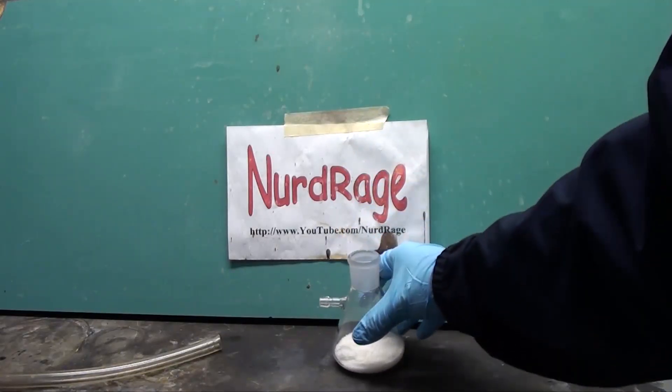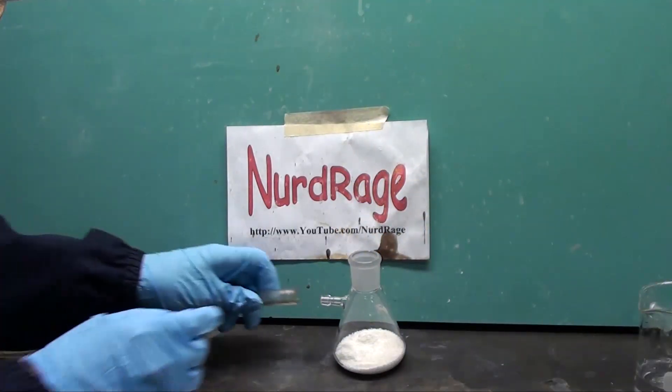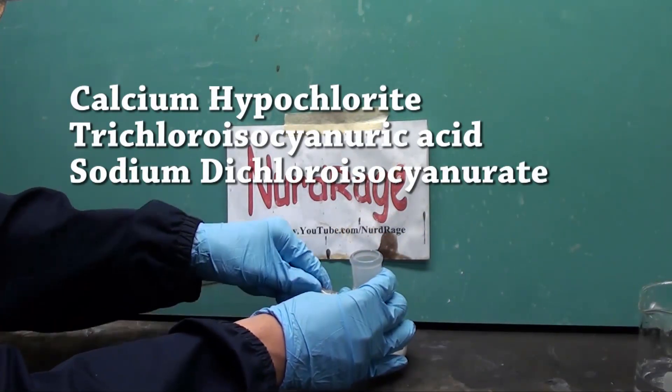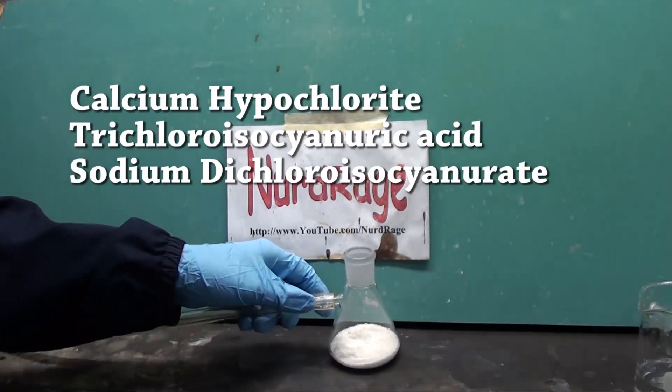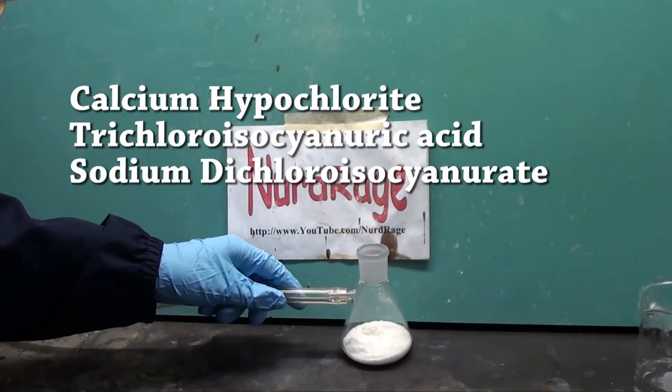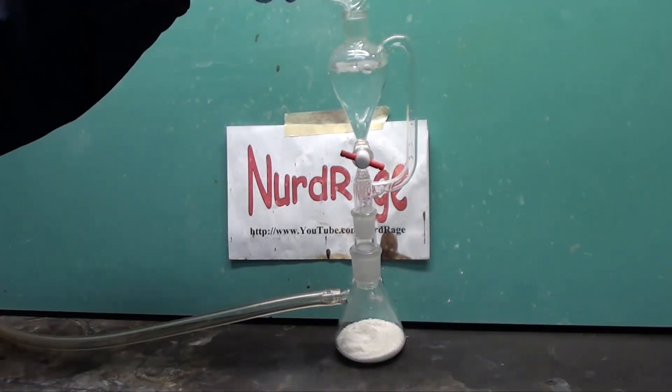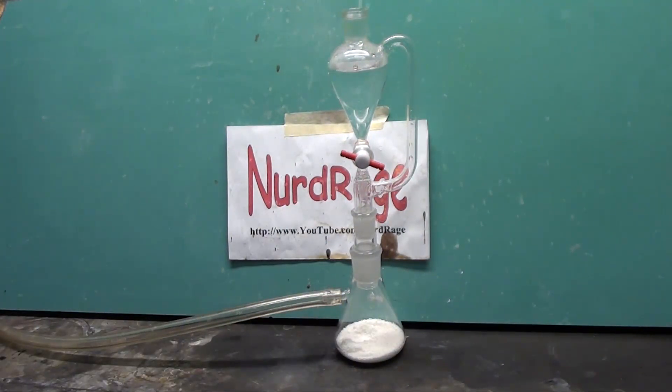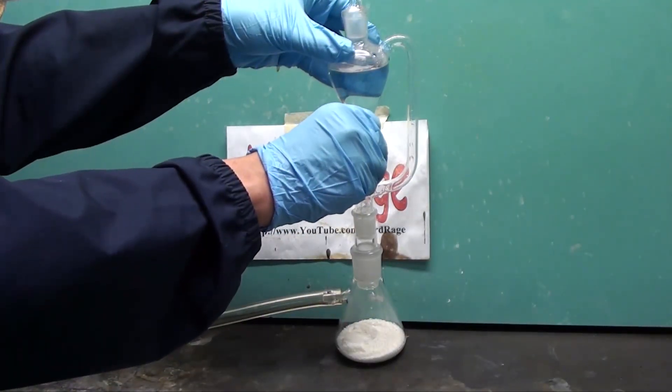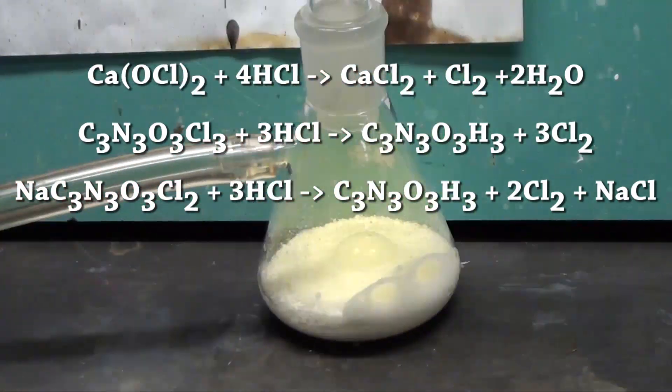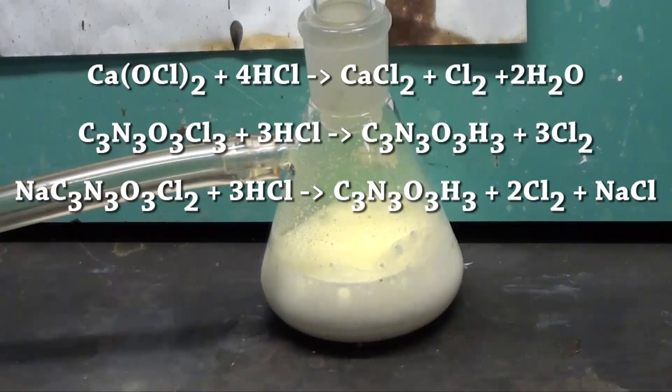This can either consist of calcium hypochlorite, trichloroisocyanuric acid or sodium dichloroisocyanurate. Using a pressure equalized dripping funnel add the appropriate mole equivalent of 6 molar hydrochloric acid. Four molar equivalents in the case of calcium hypochlorite, or 3 in the case of the isocyanuric acid versions.